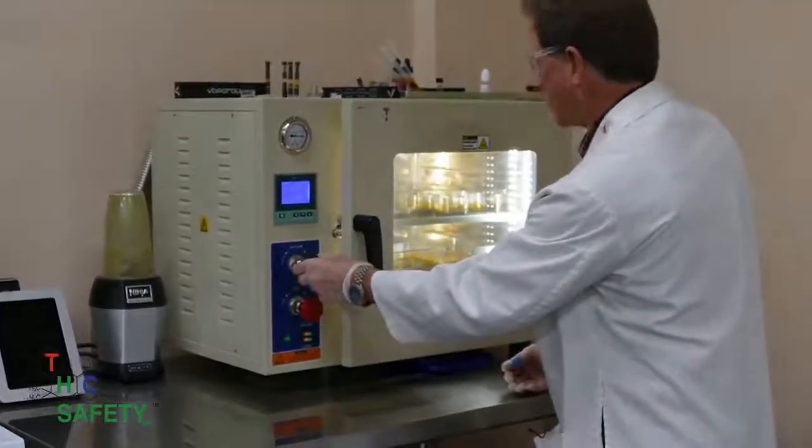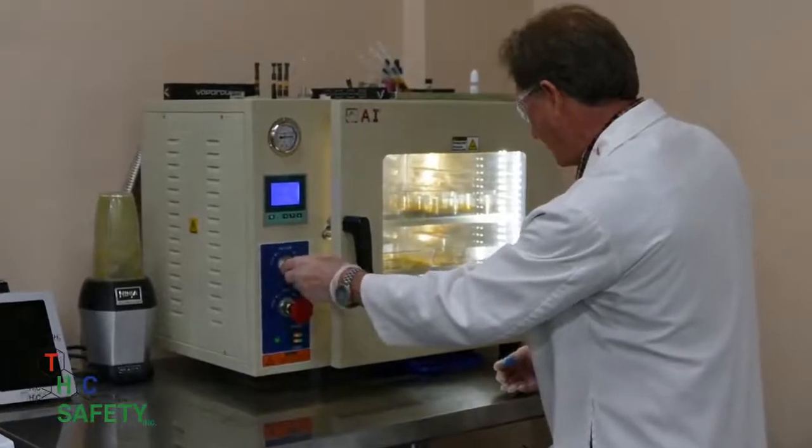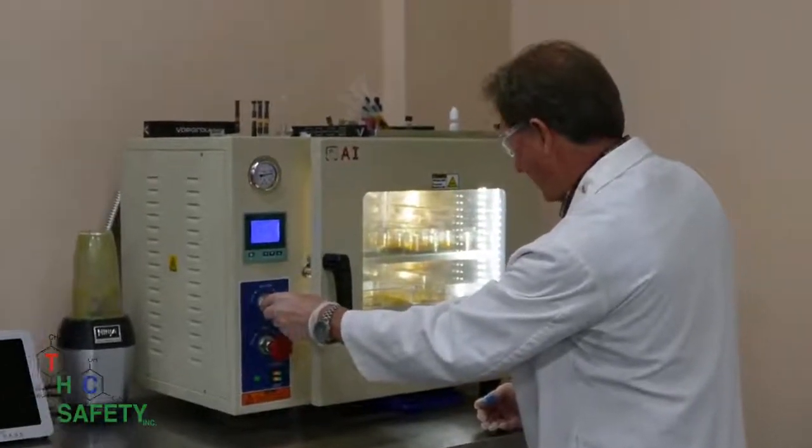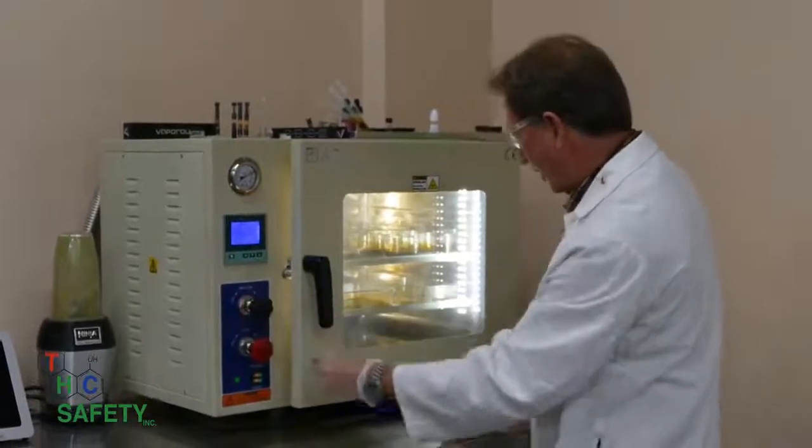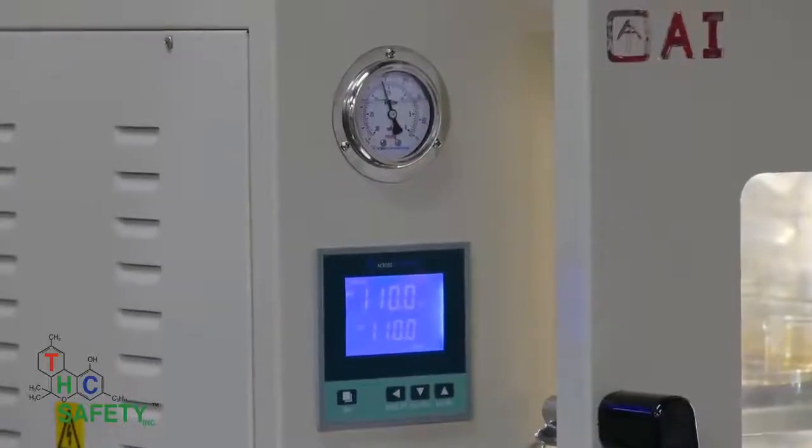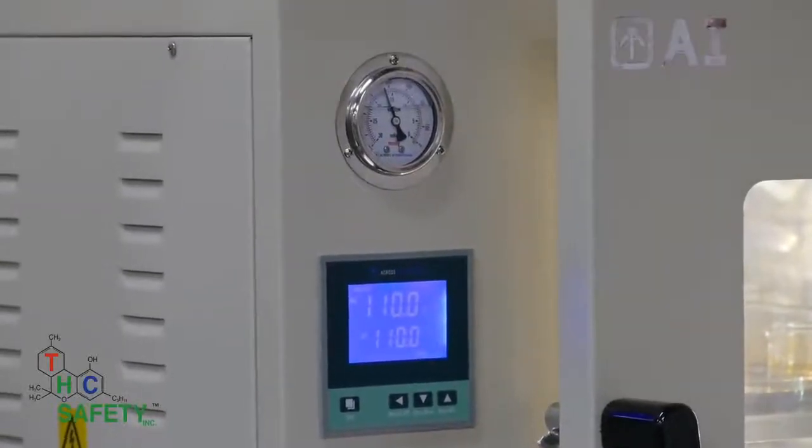We need to do this relatively slowly because we don't want to cause our ethanol solution to boil or burp. This is a good rate. Slow and steady wins the race.